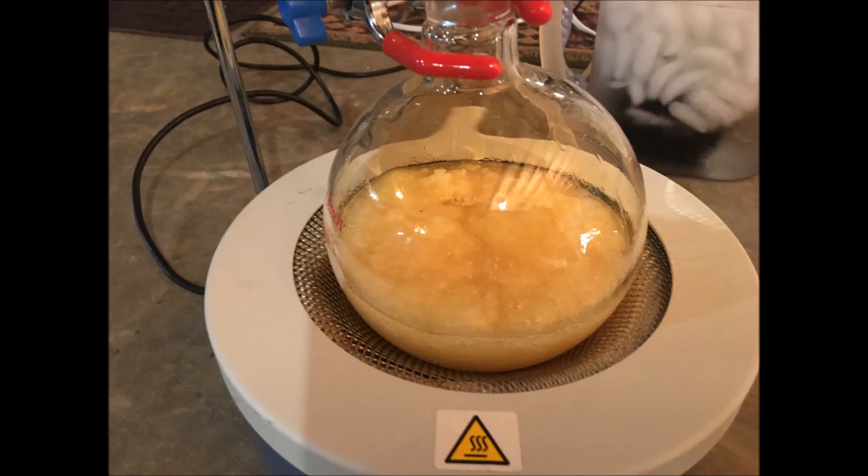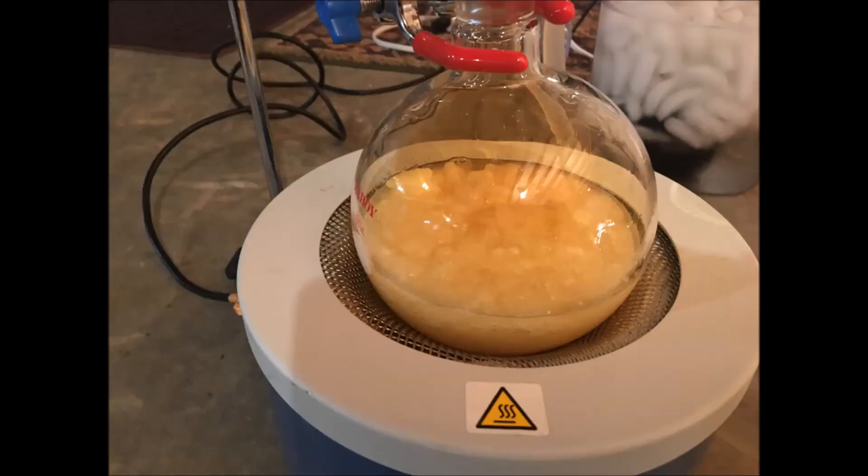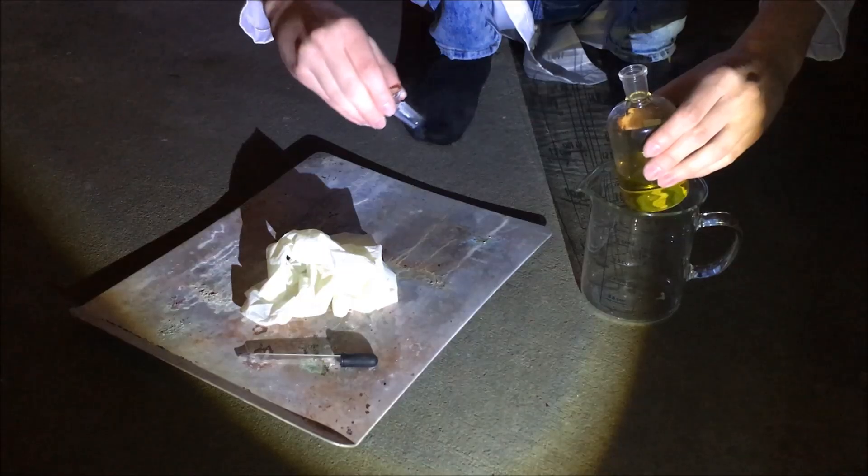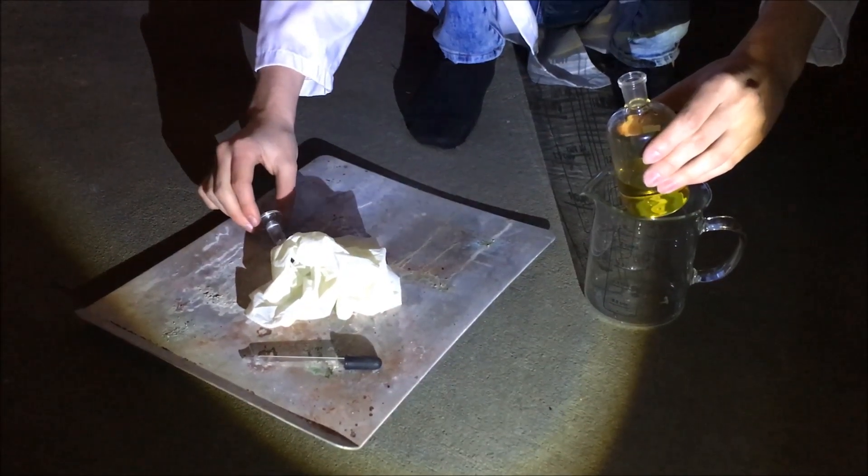Unfortunately, I saw a small amount of nitric acid leaking through one of my glass joints, so I had to end the distillation early, and I only got about half of what I expected to get. Now I'm going to test out my fuming nitric acid.